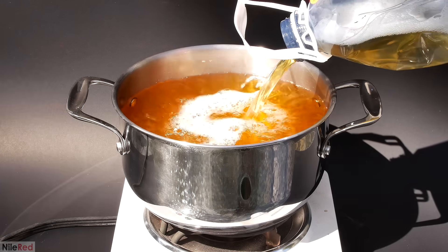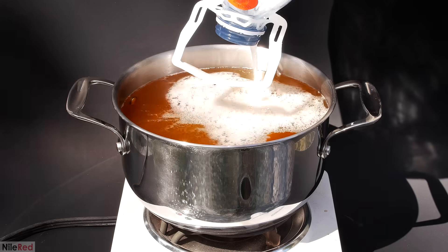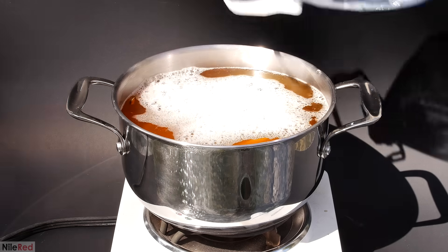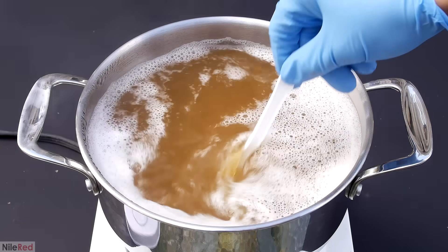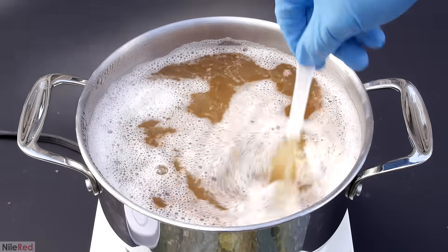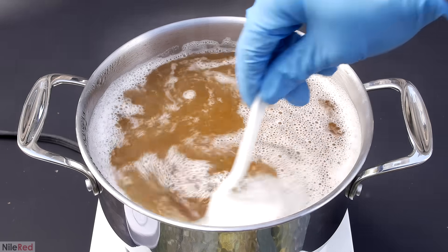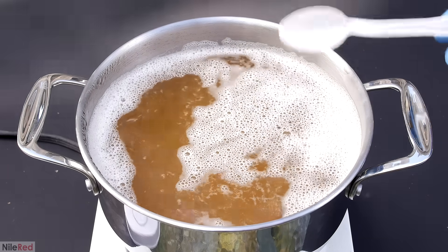I also set up a fan off-camera to continually blow on it and speed things up. As the pee is heated, proteins and minerals will start to fall out of solution, causing it to become opaque. The urea is extremely water-soluble, though, and will remain dissolved.